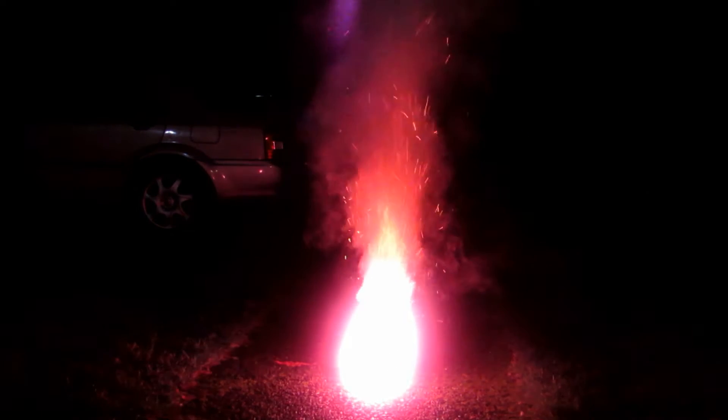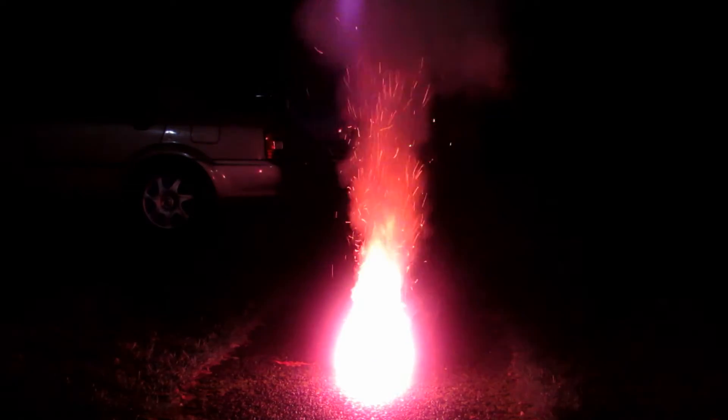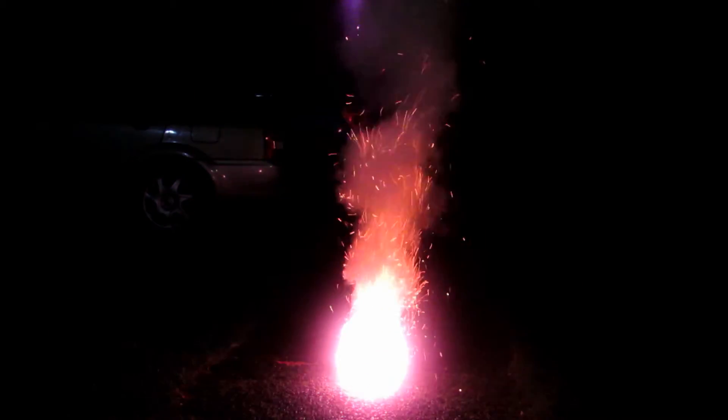And if you don't want potassium carbonate, this is just a very cool reaction on its own. Outside now — I put the mixture in a tin can and my sister is going to light it with a blowtorch. You can see a very vigorous reaction happening — lots of sparks, lots of flames, and a vigorous amount of popping. It produced lots of smoke and left a very hot tin can. We'll take this inside and recover the potassium carbonate.